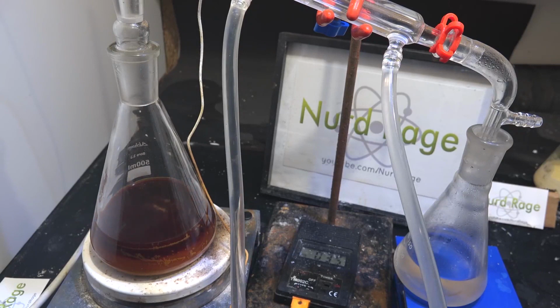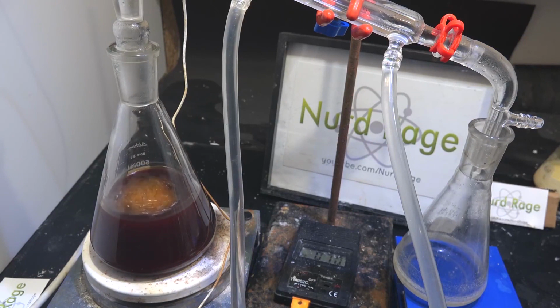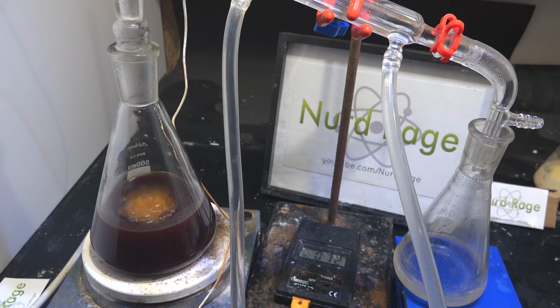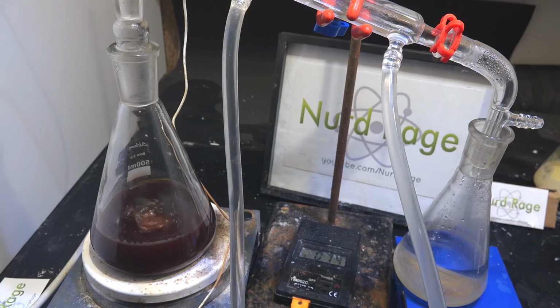Now turn off the heating and add in 100 milliliters of water. Turn the heating back on and keep boiling off more solvent. I want to essentially remove as much of the organic solvent as I can and replace them with water. I didn't simply boil down dry earlier because I don't know how sensitive pyrimethamine is to heat. If I boil dry, I could destroy the pyrimethamine. Adding in water first means we can remove the solvents and still remain below the boiling point of water.